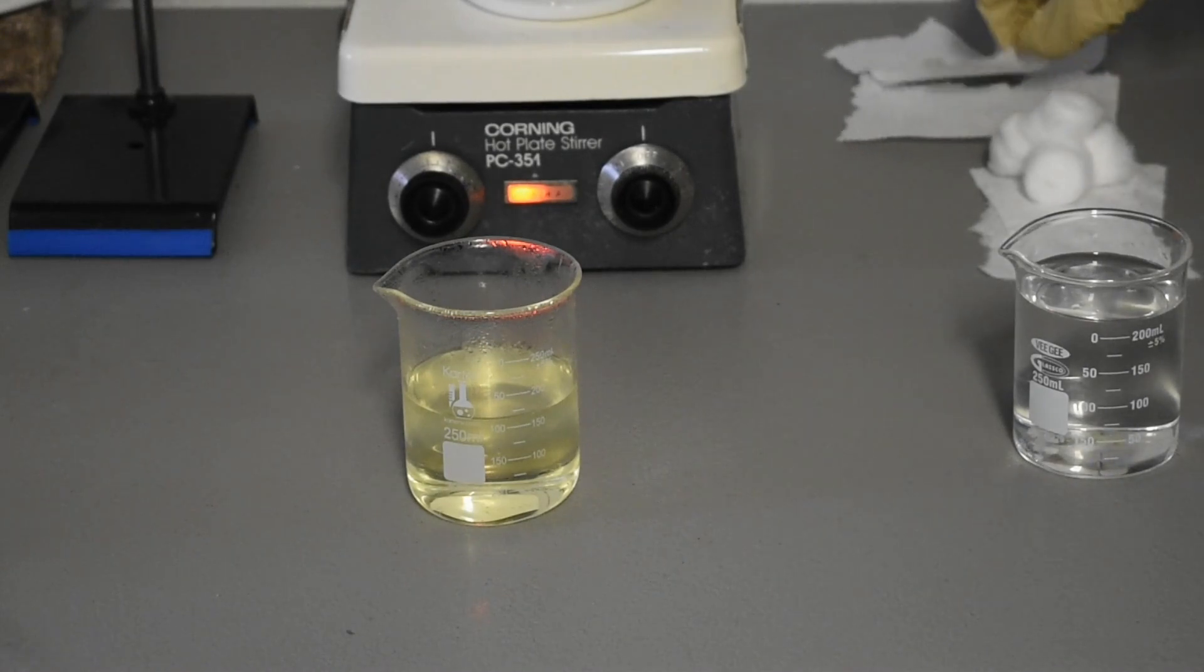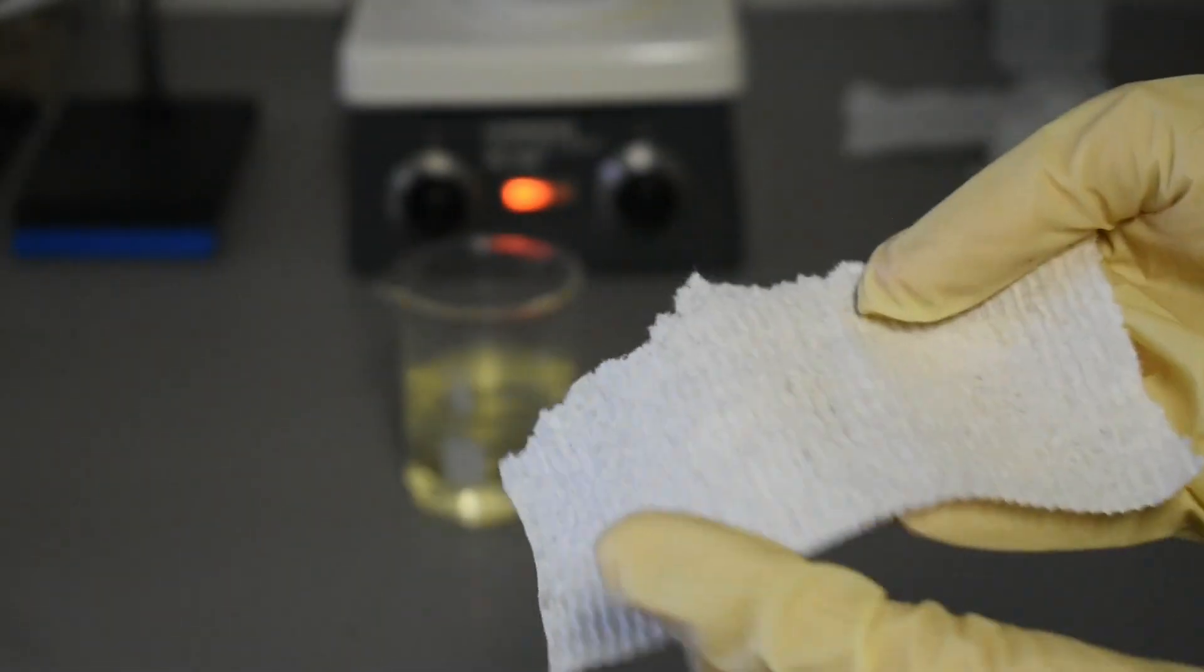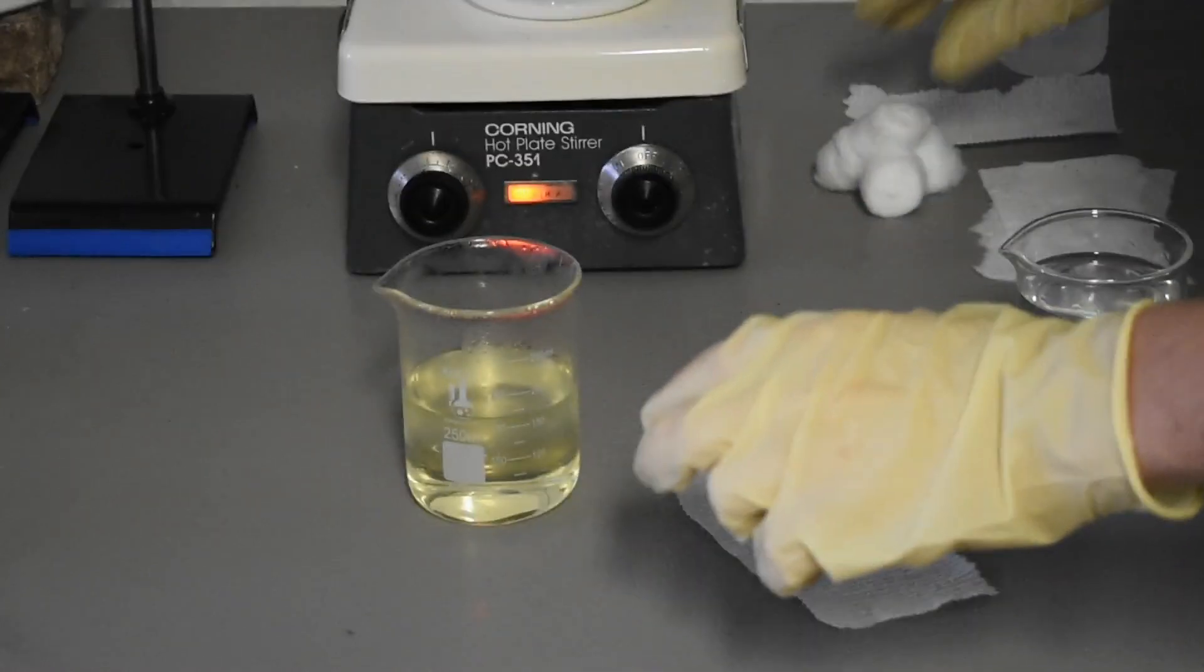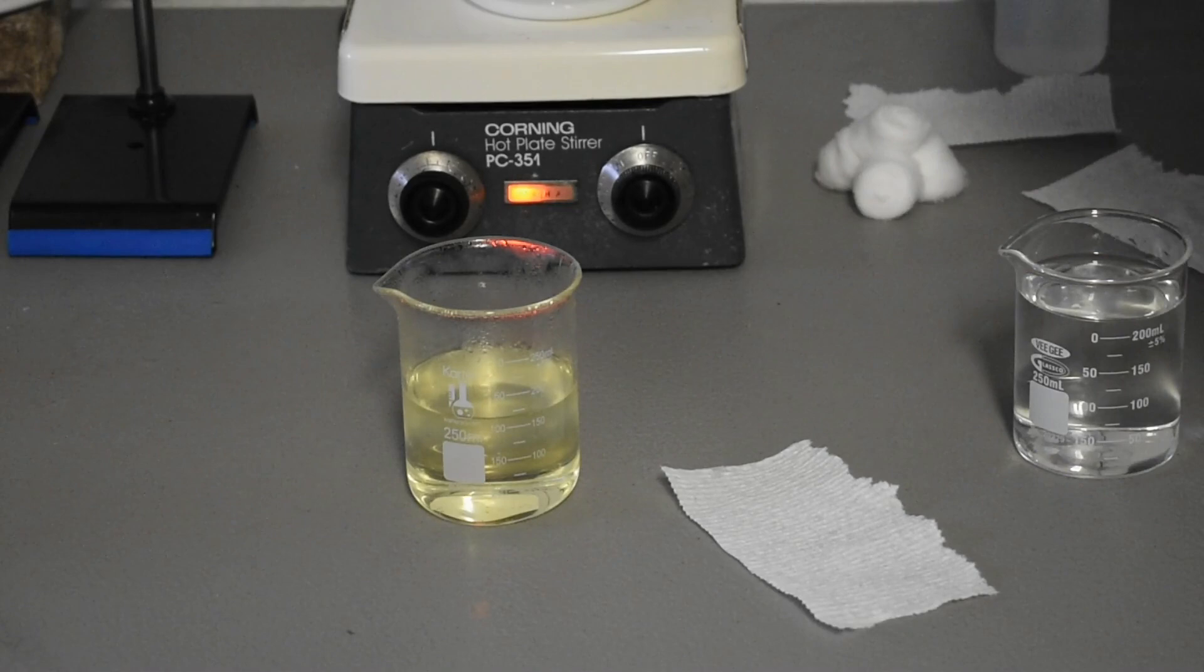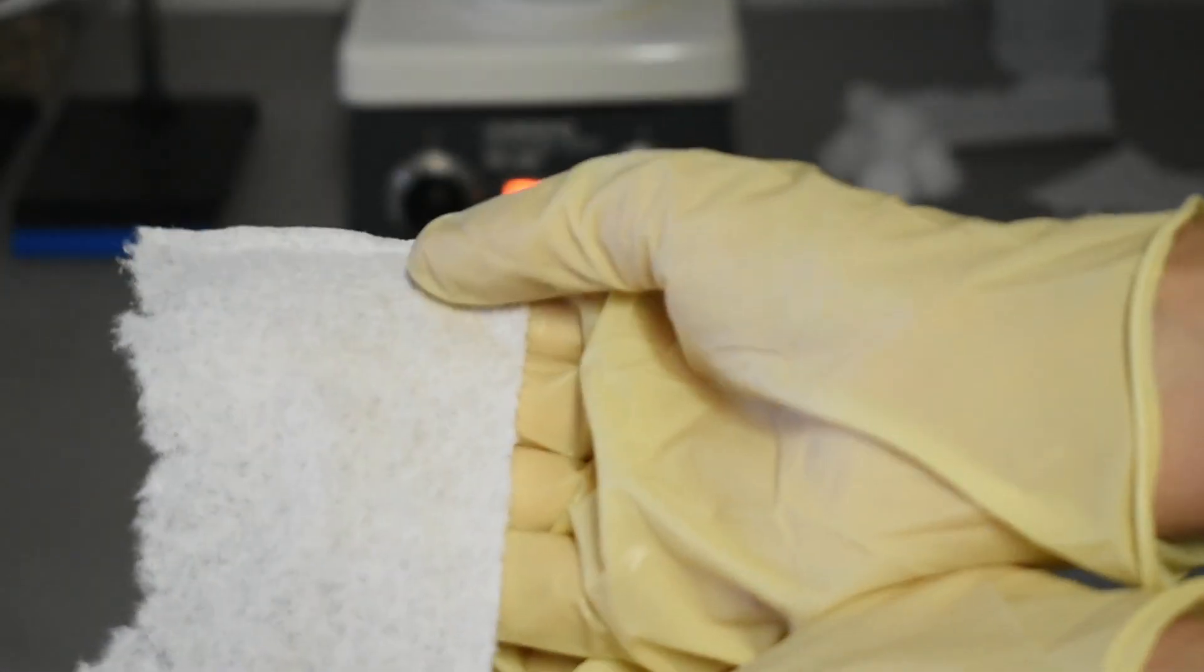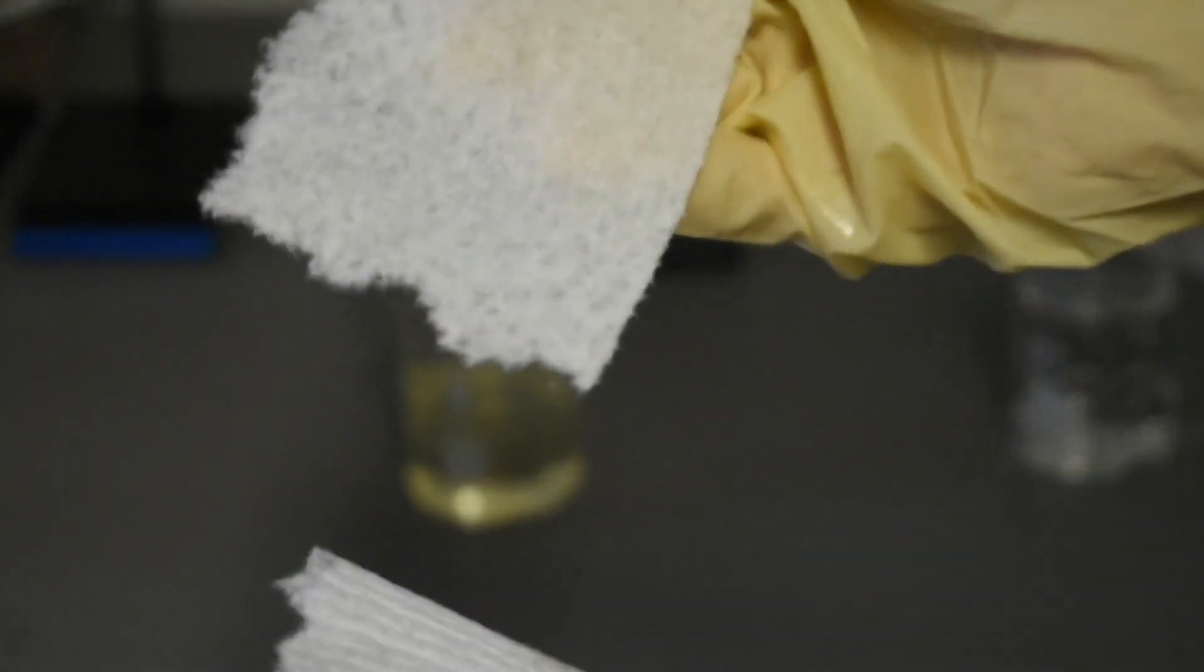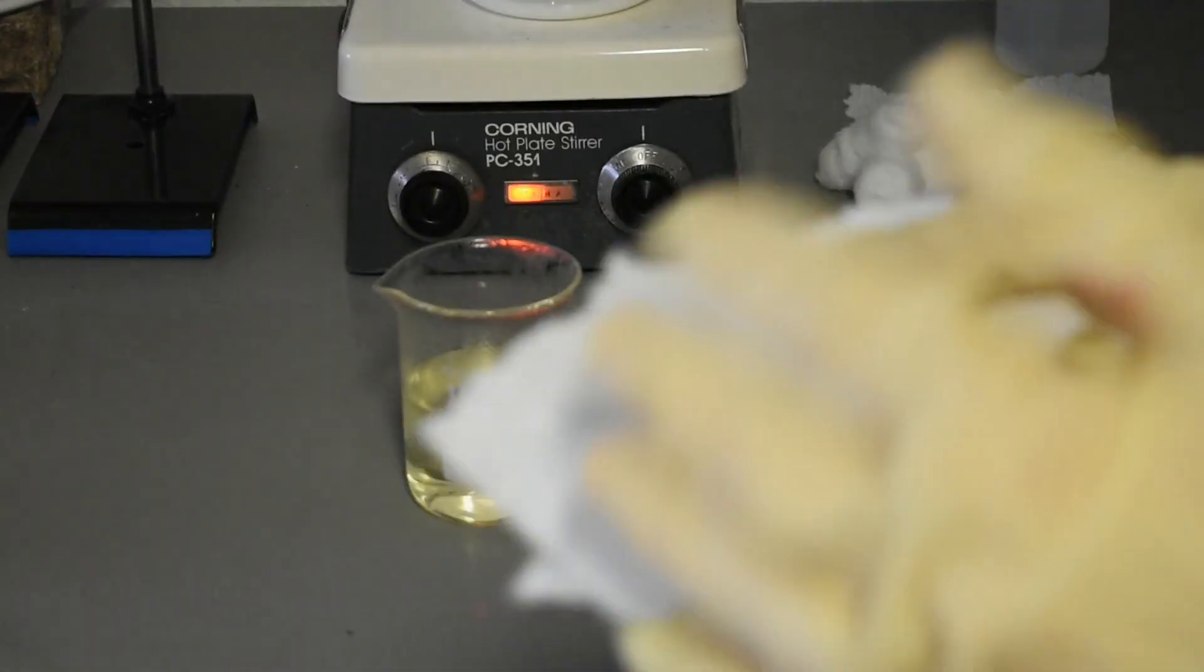So I have these paper towels here, they're like the normal ones you get at the store, these are probably more common. And then I also have these more, I don't know, fancier paper towels. You can see the difference between them. I have a feeling this is going to burn better, it's a lot denser, but we'll see.